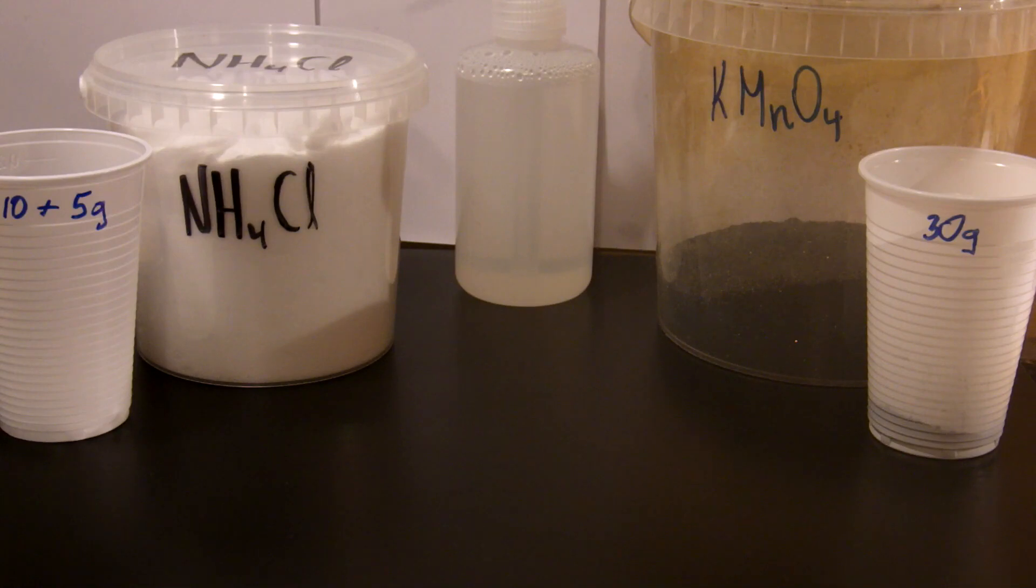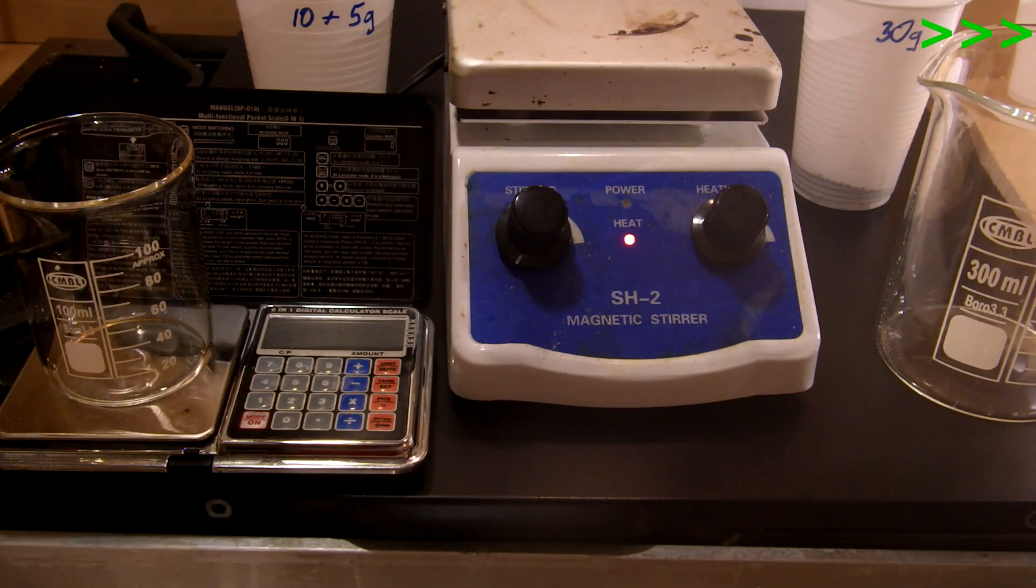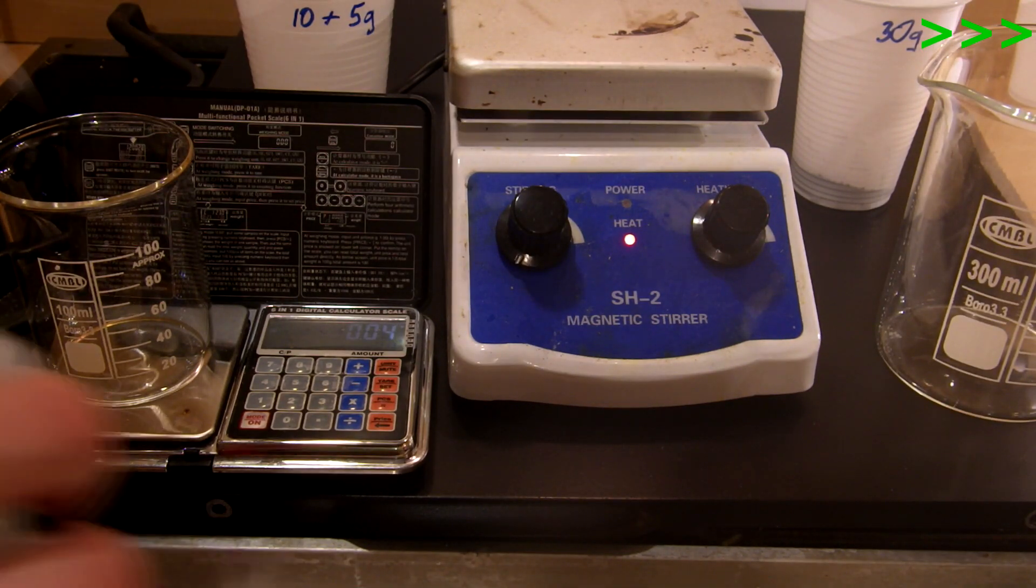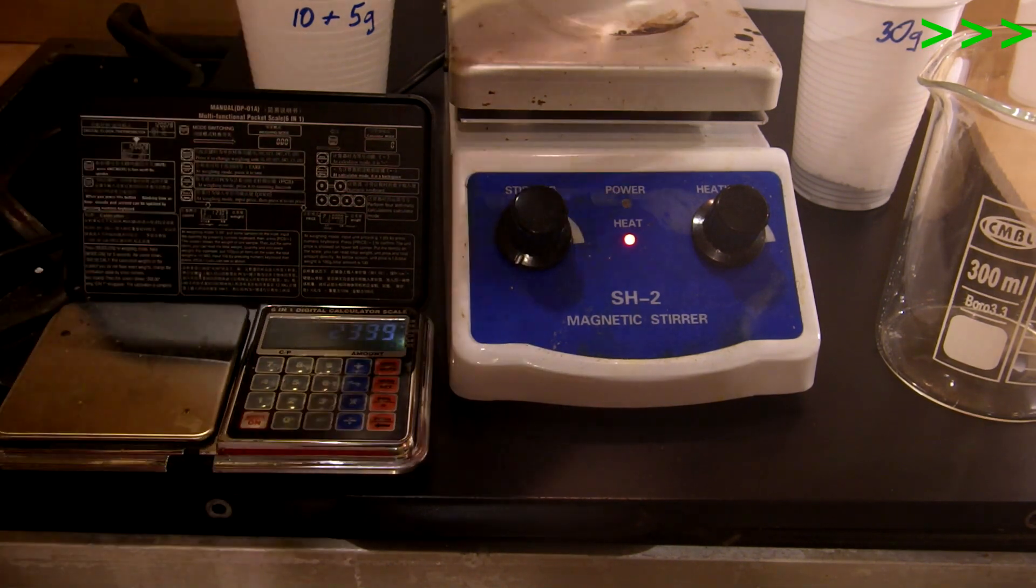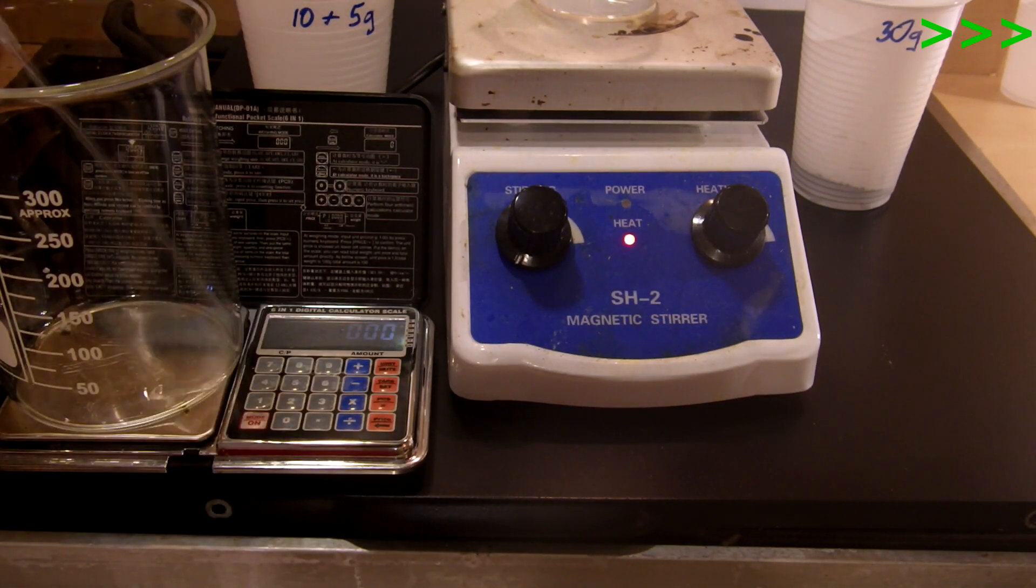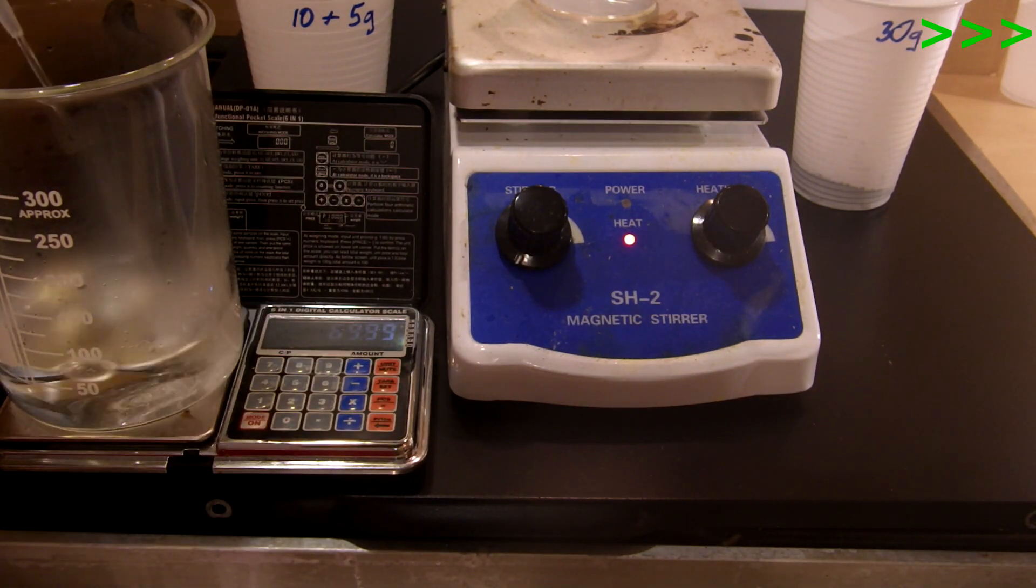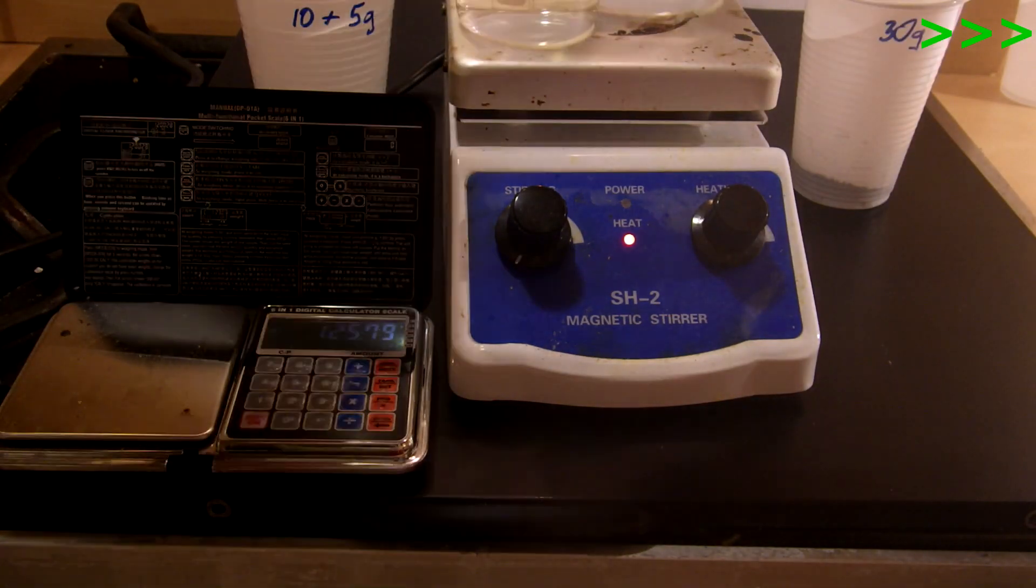Now the solvent. For best yield, as little water as possible should be used. Temperature should not break the 65 degree Celsius mark, otherwise permanganates start to decompose quite quickly. Therefore I looked up solubility for both compounds and I will need 30 milliliters of water to dissolve ammonium chloride and 120 for permanganate. I ended up adding a little more water for washing, but like 20 milliliters tops.